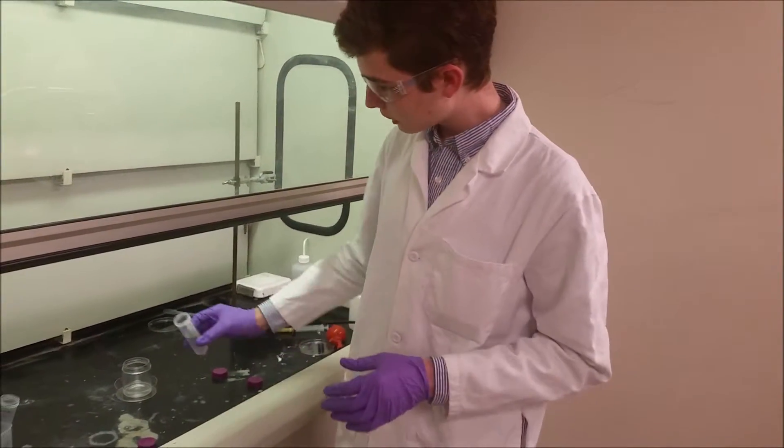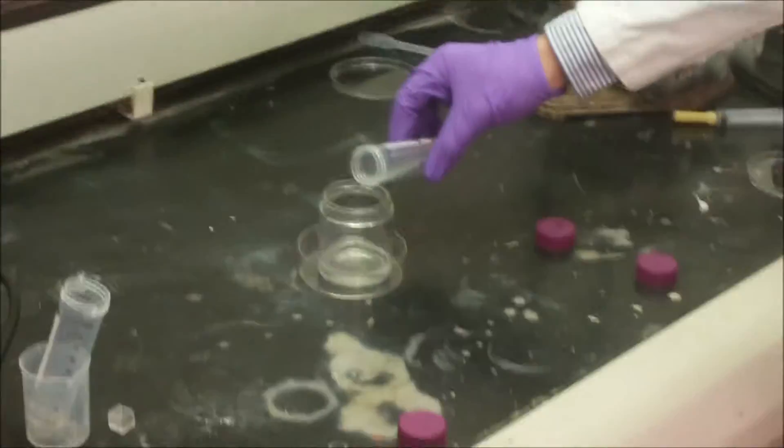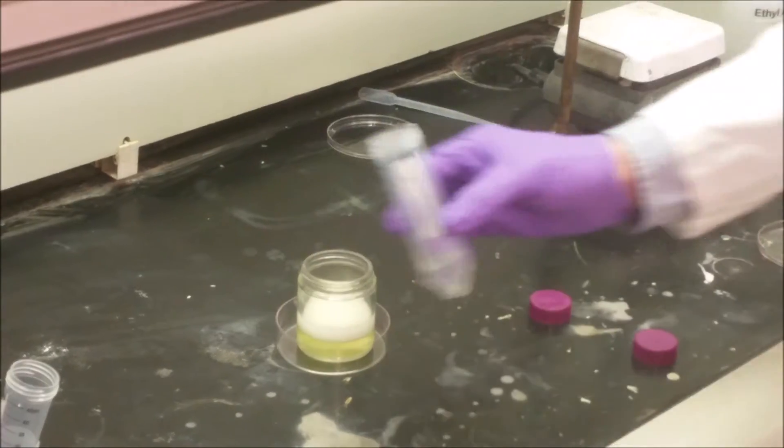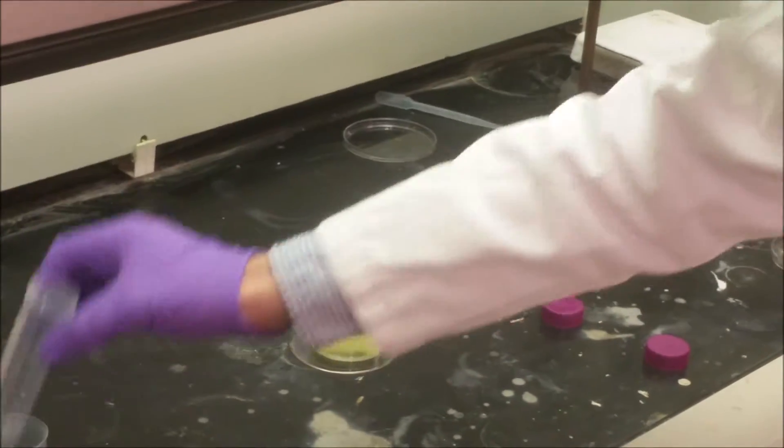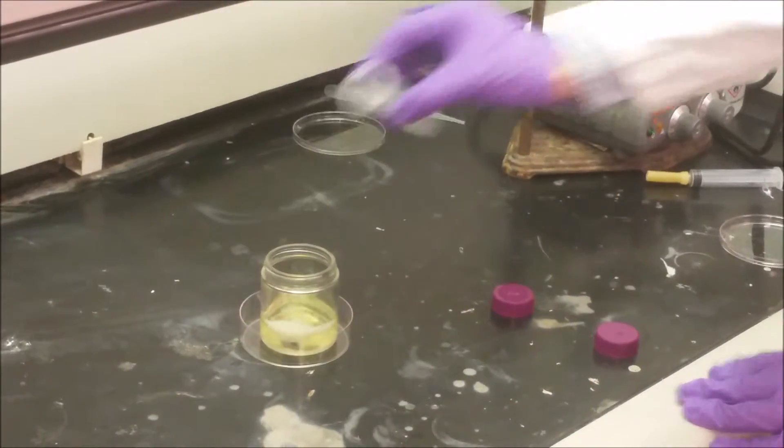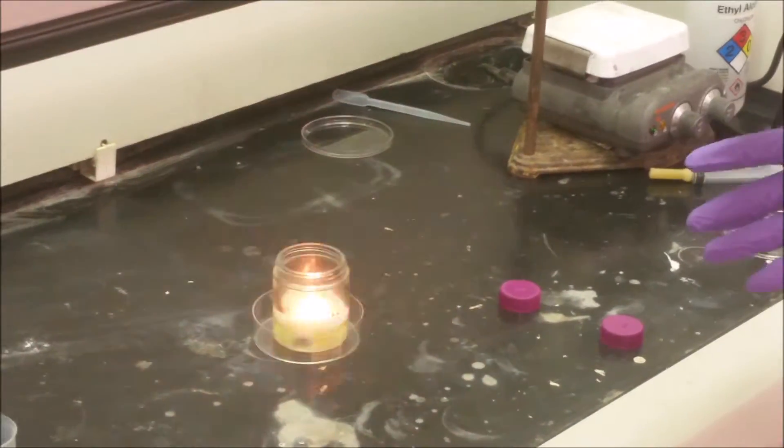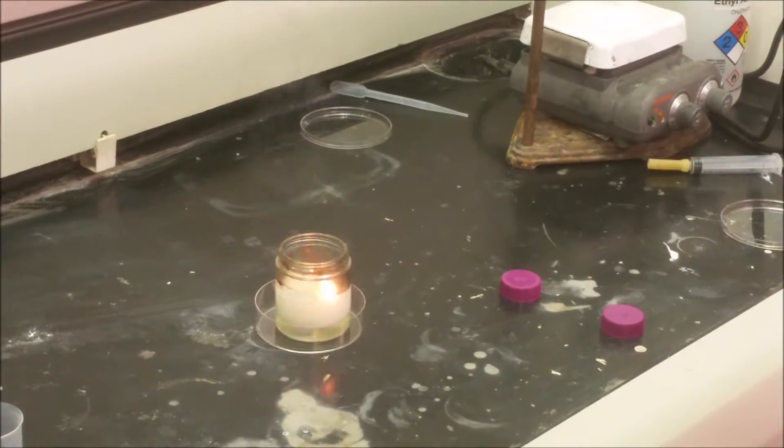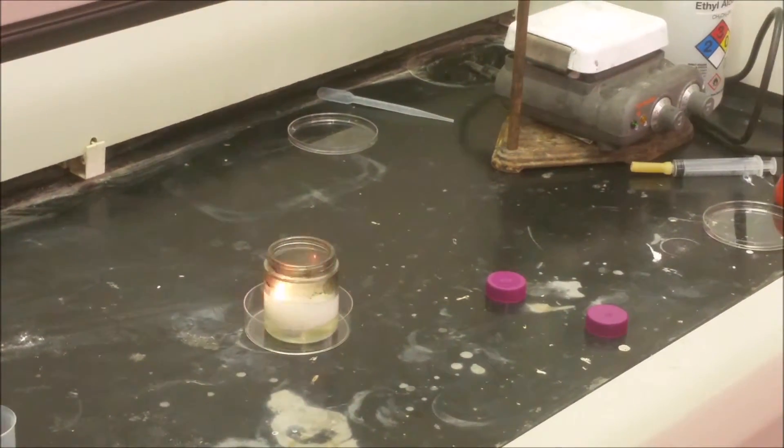When I add the bleach to the hydrochloric acid, you're going to see a lot of fizzing, and it turns green. The reason for that is because it's producing chlorine gas. And if I drop the calcium carbide in, the acetylene it produces will explode spontaneously upon contact with that chlorine gas.